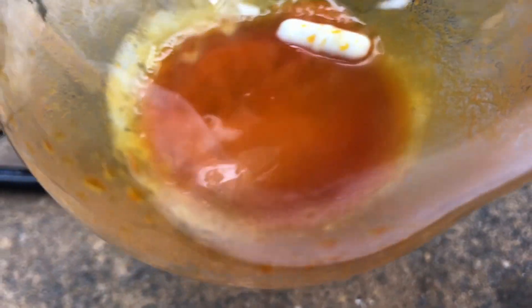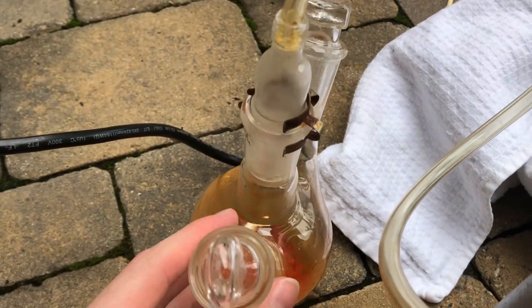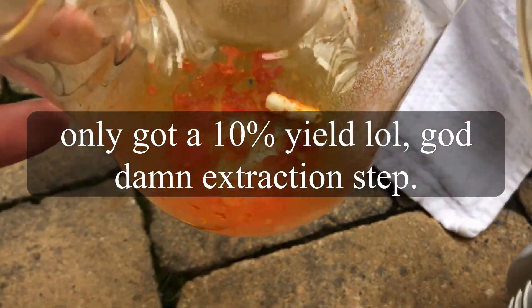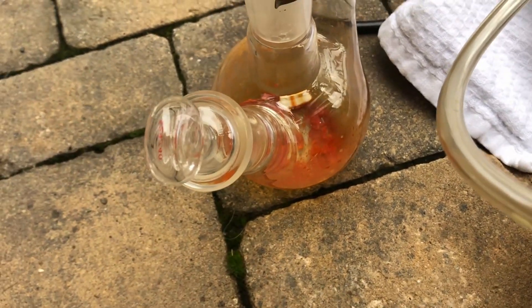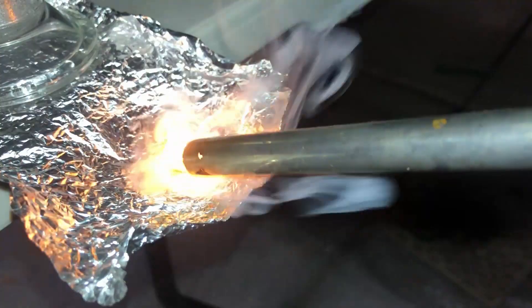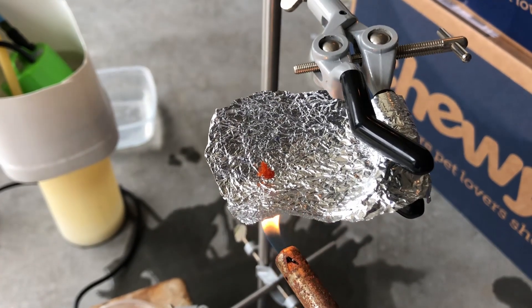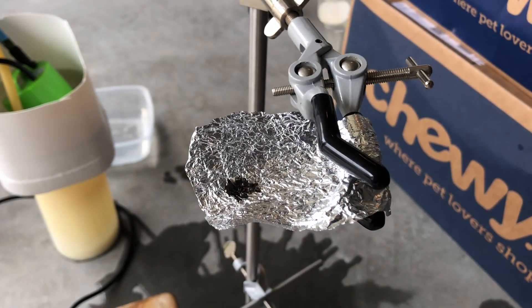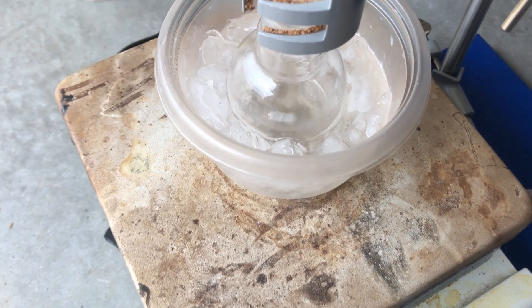My actual vacuum pump is a trooper — I'm very proud it survived. Once it sucked away the rest of the ether I got some nice crystals of nitroacetaldehyde oxime. They're more red-orange than the supposed yellow, but it ends up working. To prove I actually have my product, I'm doing a burn test — the first is the crude stuff and the second is the pure stuff.